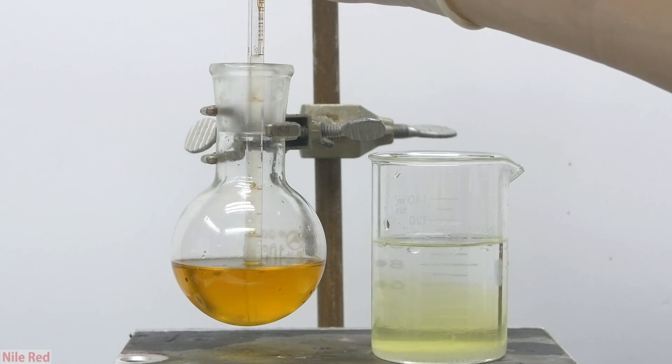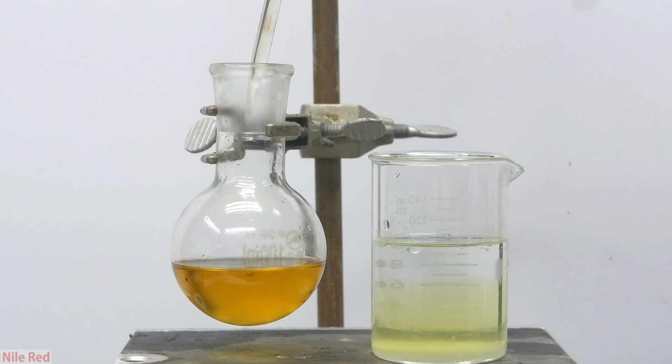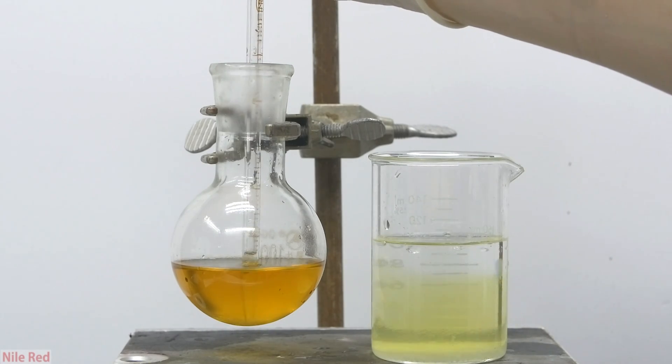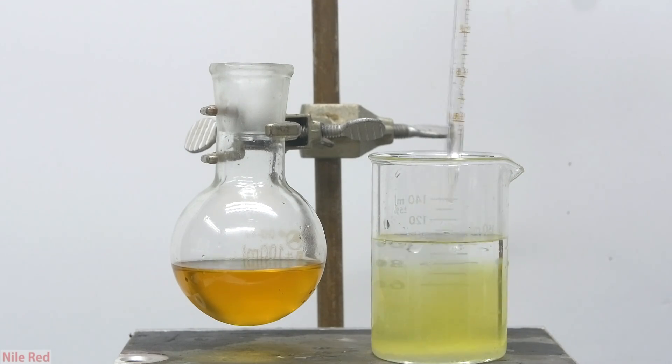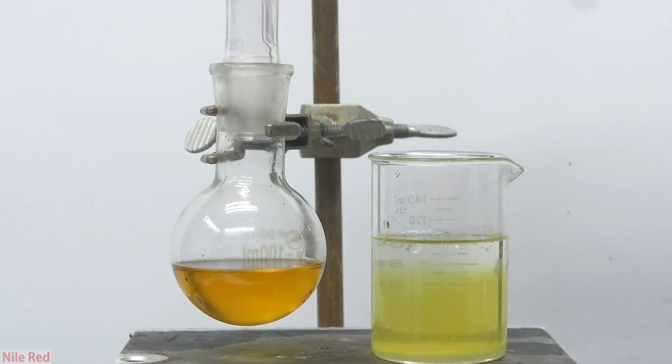Instead of using a separatory funnel, I decided to remove the lower water layer just by using a pipette. All of the water that's removed is heavily contaminated with acrolein, and this is neutralized in the basic solution you see on the right. One very important thing though is to not let the pipette tip touch the sodium hydroxide solution. If the pipette gets some sodium hydroxide on it, and we actually introduce it into the acrolein, it can all start to polymerize.